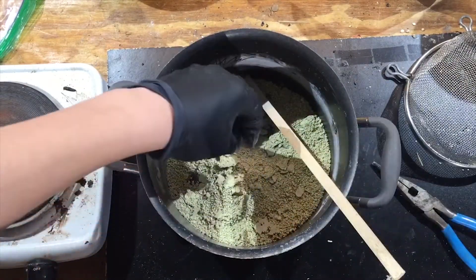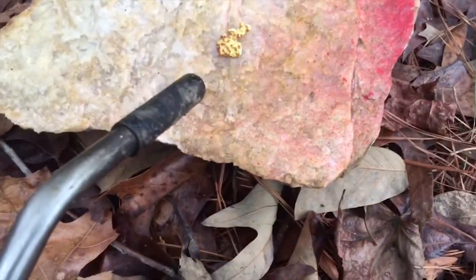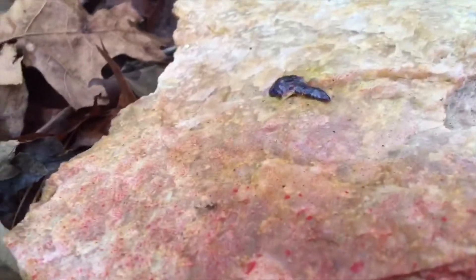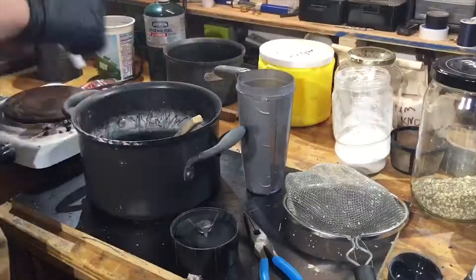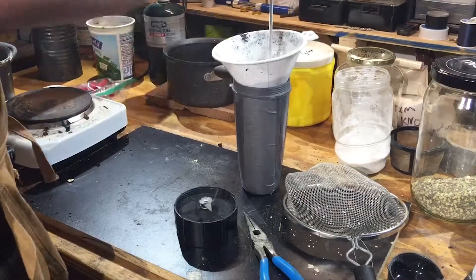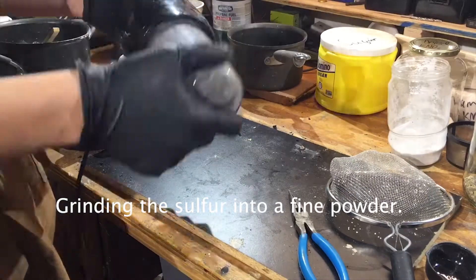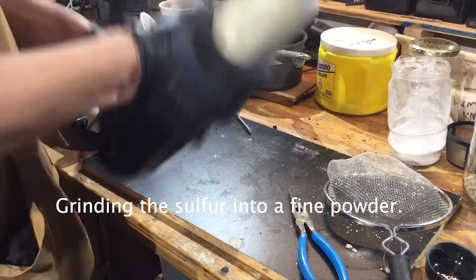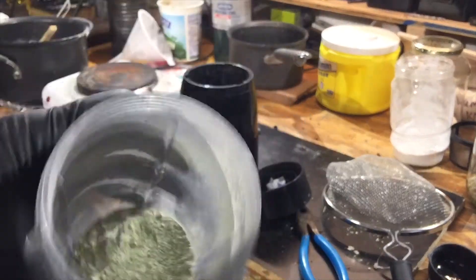But I'm going to go outside and see if this burns. Alright, I'm going to set my sulfur on the rock here and I will just light it on fire. Very hard to see but there is a flame coming off of that — just a very light blue flame.